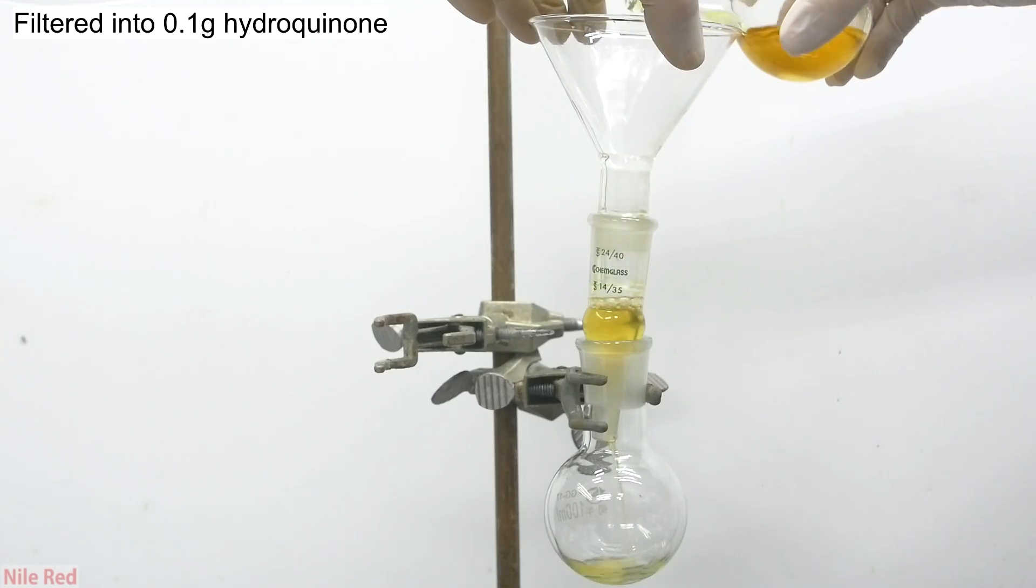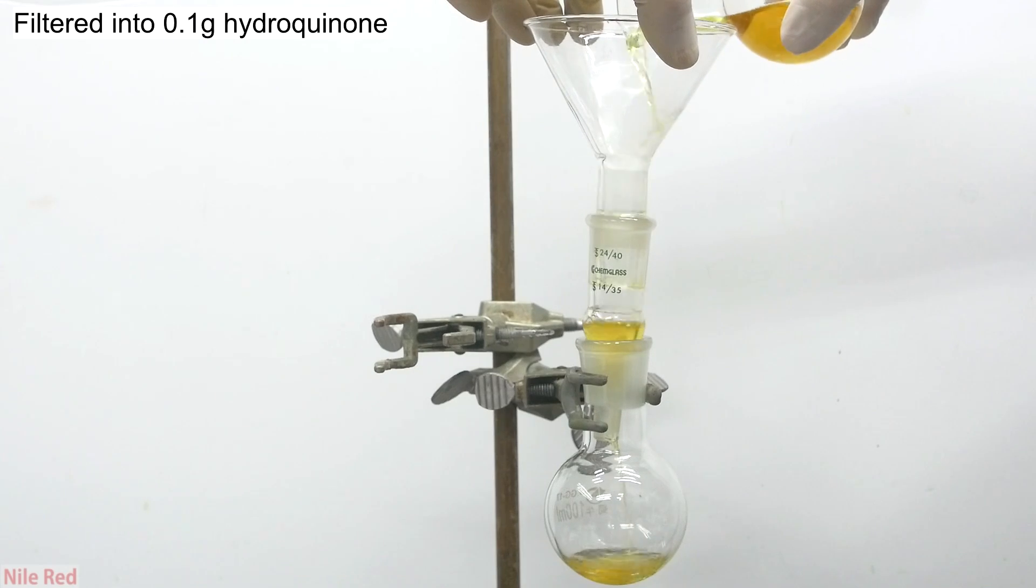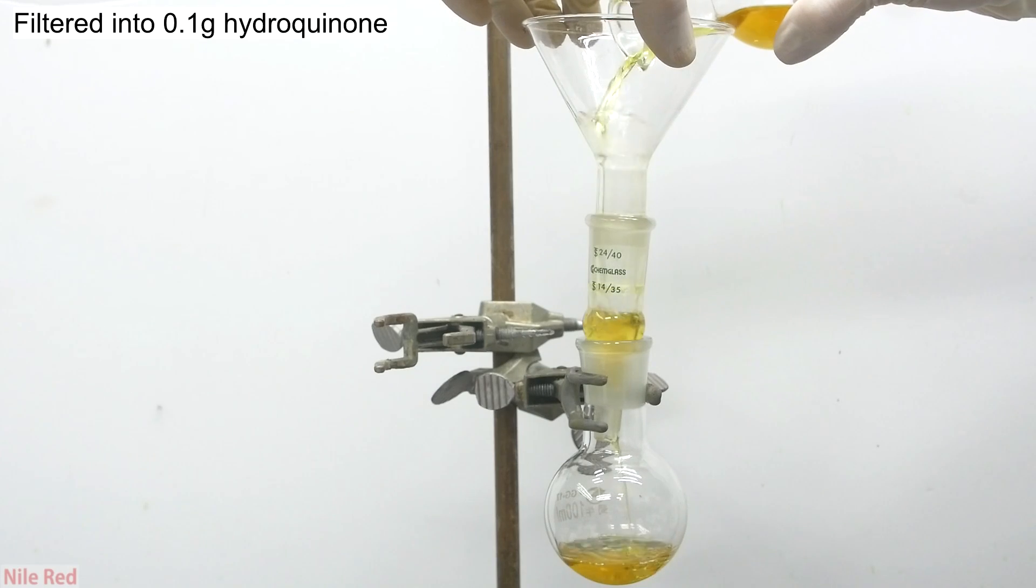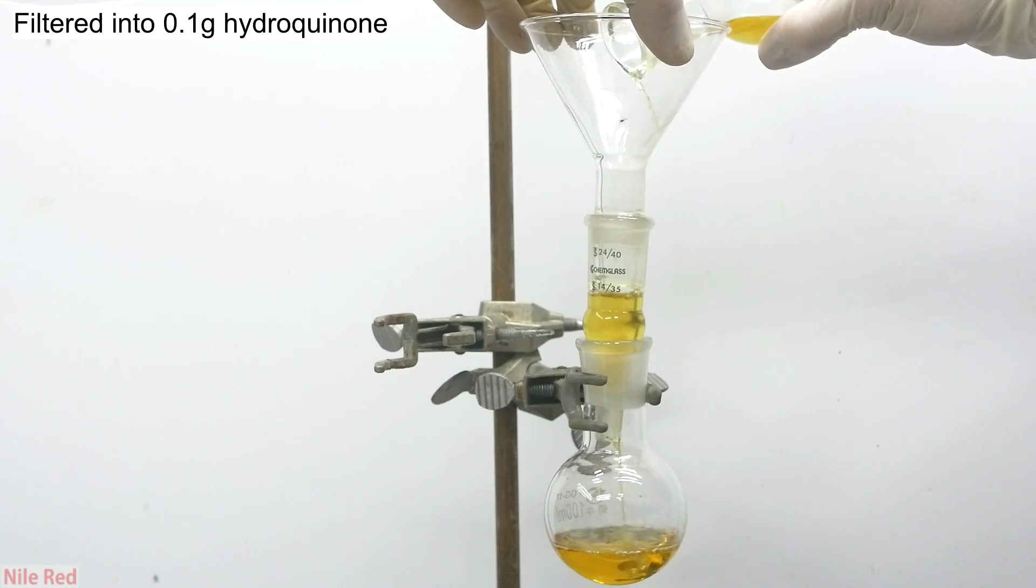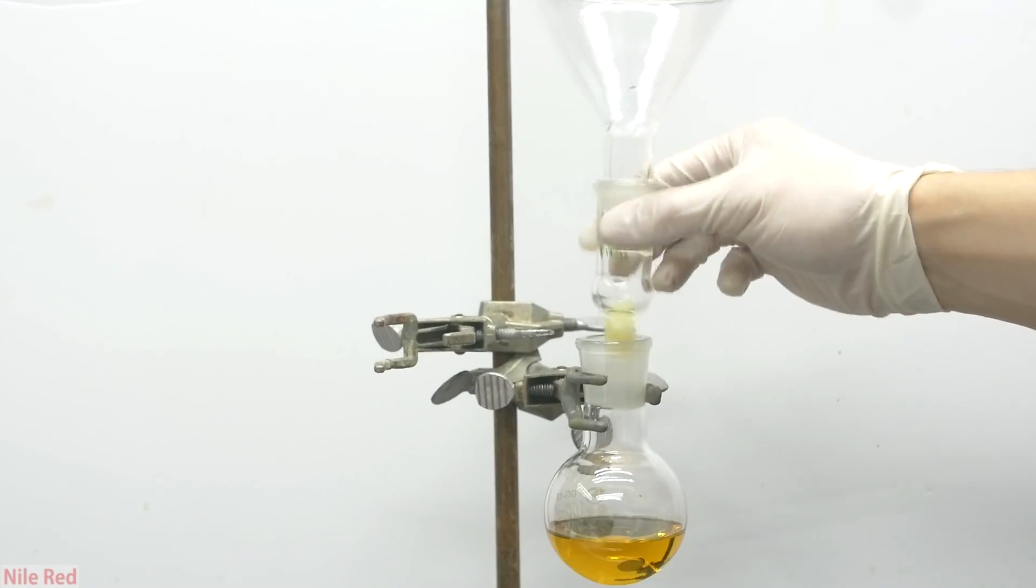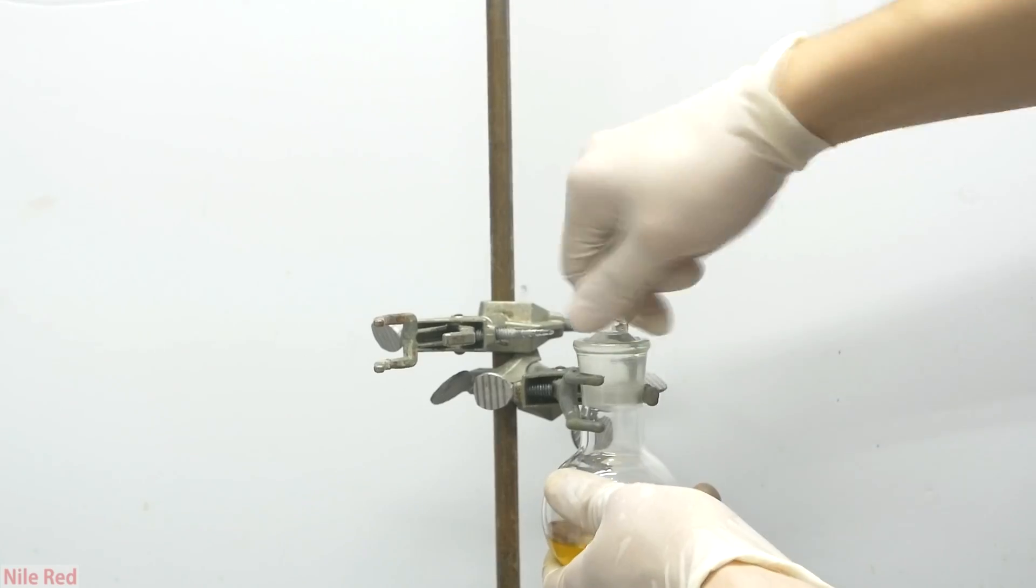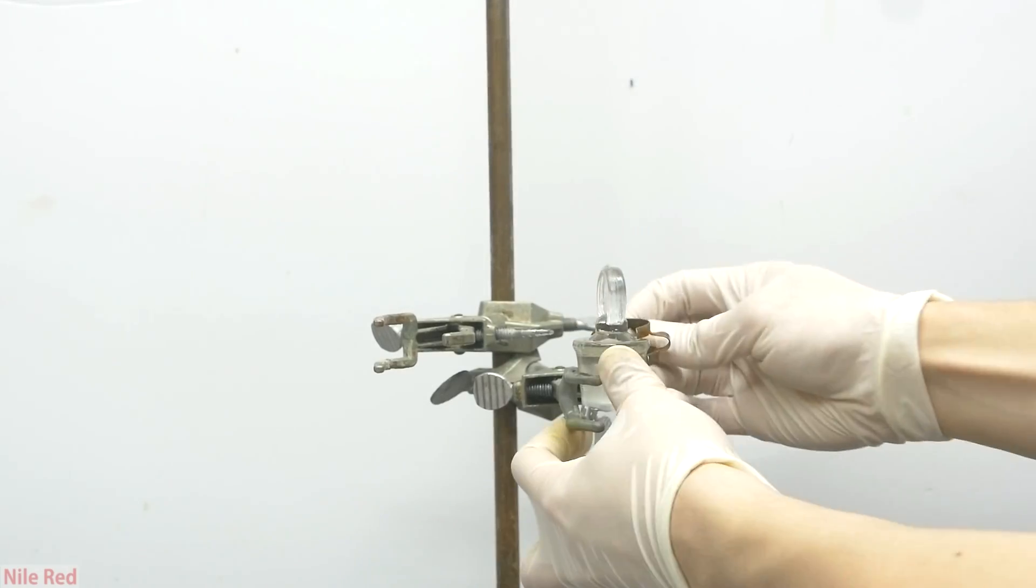So now we move on to our filtering step, where the acrolein is filtered into a flask containing about 0.1 grams of hydroquinone. Hydroquinone is a stabilizer, and it's important to mix it with the acrolein to prevent it from polymerizing. After everything had filtered through, the funnel was removed, and a grease stopper was used to seal the flask.